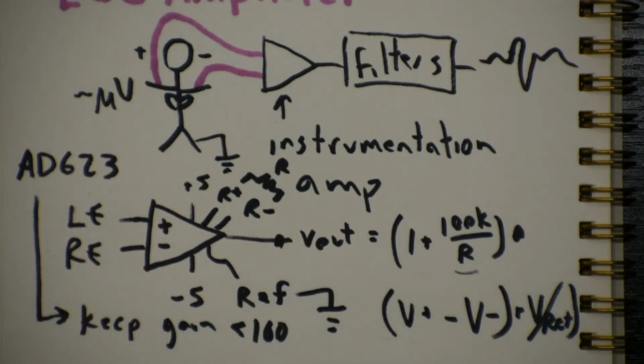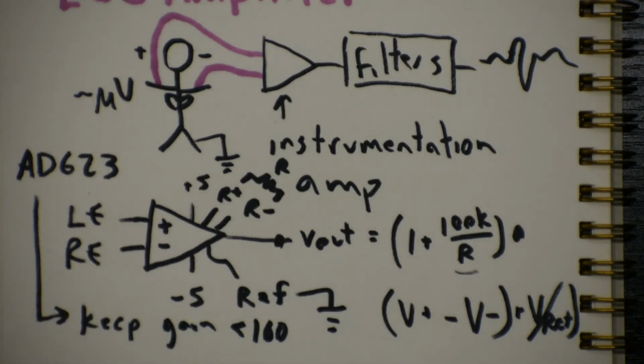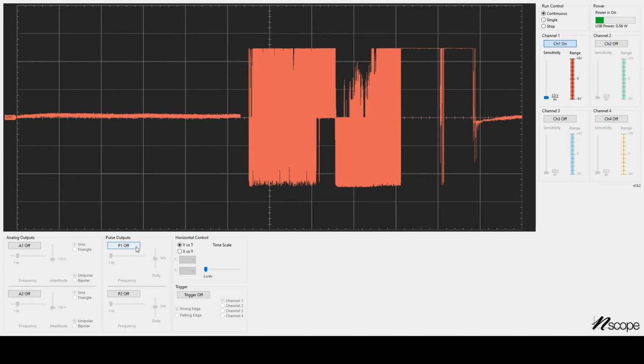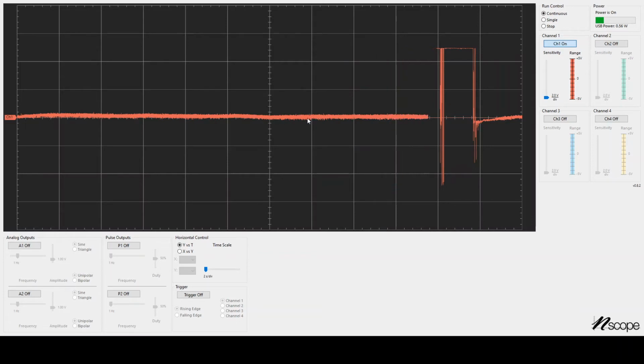So I'm going to show you what mine looks like. After I clip myself back in, this always gets a little tangly. So let's go to our nscope plot. The big amount of noise that you see there, that's when I wasn't plugged in at all. And so this is just kind of a high gain system that when there's no signal plugged in, we see a lot of noise. But now I'm plugged in and the signal's pretty small. We don't really see a heartbeat.